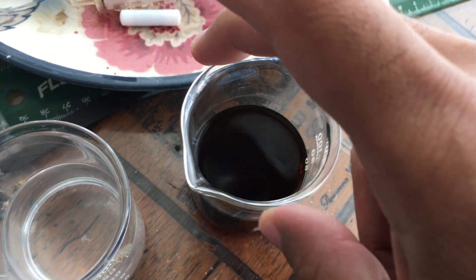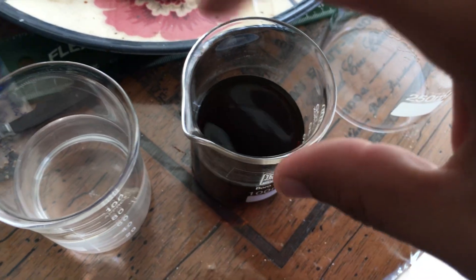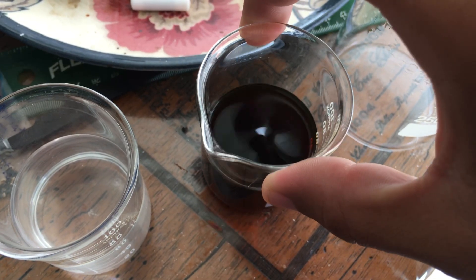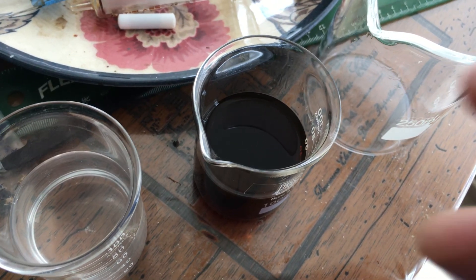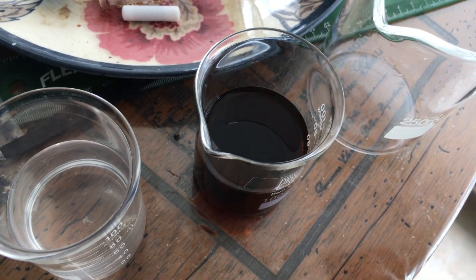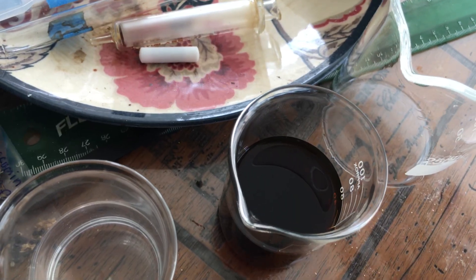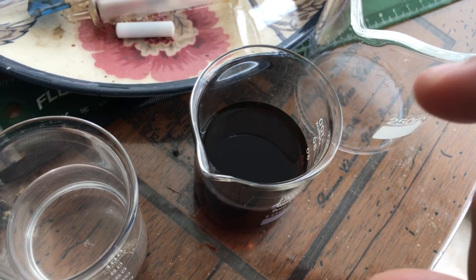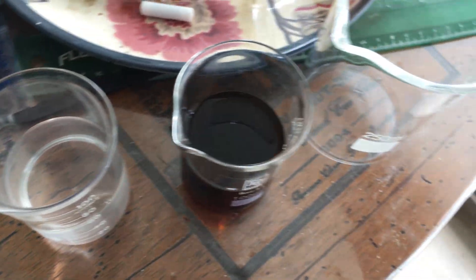I'm continuing to work on the anti-solvent precipitation. This is a 96% ethanol pull of the solution after it evaporated. Initially you get that precipitate which does contain some of the alkaloid, but only a smaller portion and a whole bunch of gunk — that was separated and the solution kept. I then put it into a wide dish and evaporated it for about a week or two.